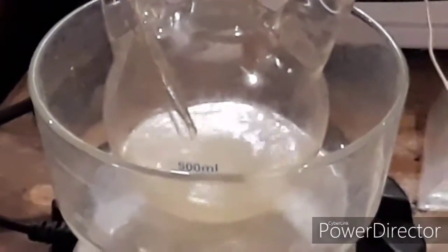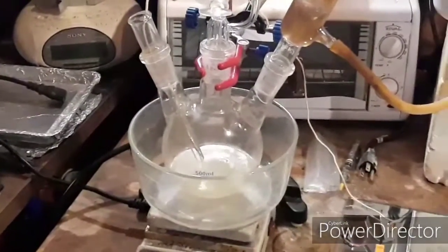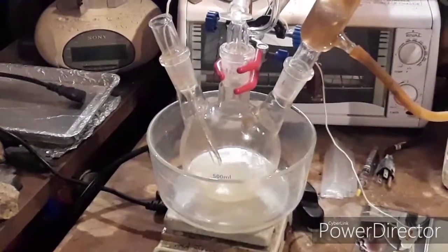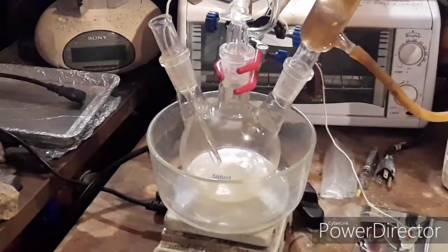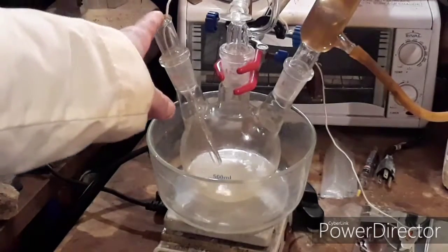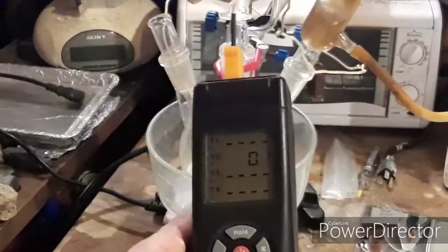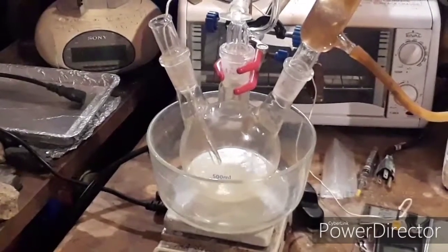To start, I'm using crushed ice with a sprinkling of sodium chloride on top, and I'll probably add some cold water as the acids are nearly all added in. You need a three-neck flask for this reaction — one neck has a digital thermocouple going into it. As you can see, we are at 0.3 degrees Celsius right now.